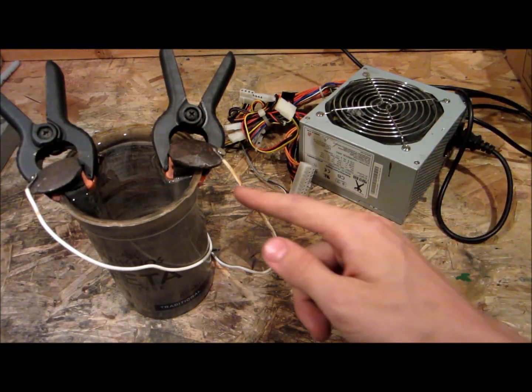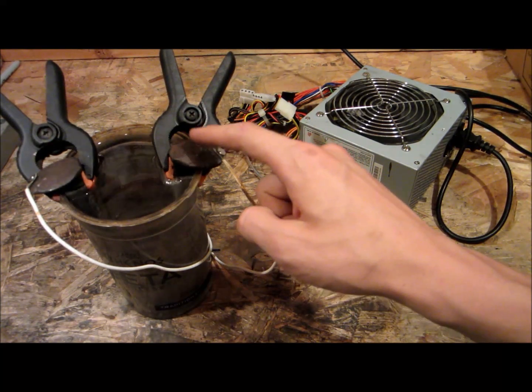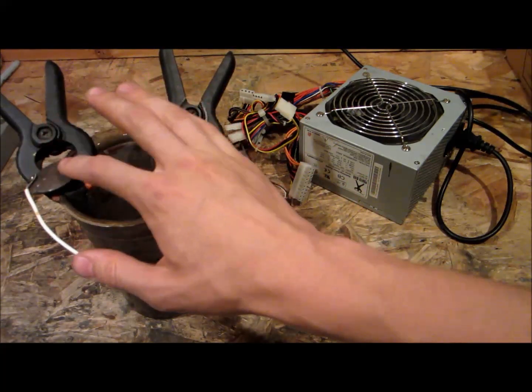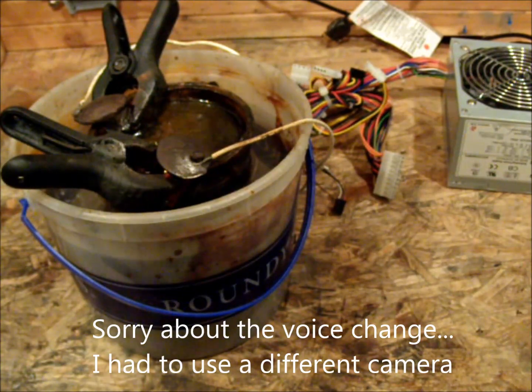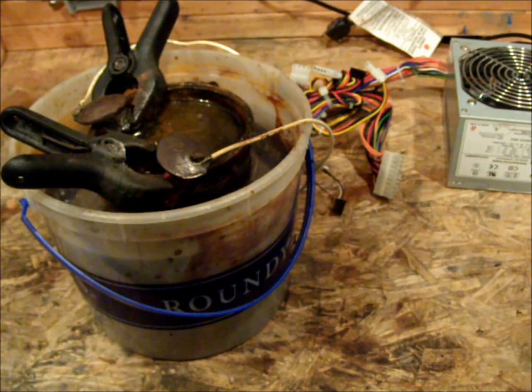Once the power is on, you can see that there are lots of bubbles evolved on the negative terminal. The negative will stay the same weight, and the positive will be slowly eroded away until your solution is very black and completely covered in sludge. After about 36 hours, the electrolyte bath has turned a very dark brown, black, muddy color. I also used an ice cream bucket full of water as a secondary containment and coolant system, because the electrolyte bath was getting very hot and I don't want to boil away water while leaving it unattended.